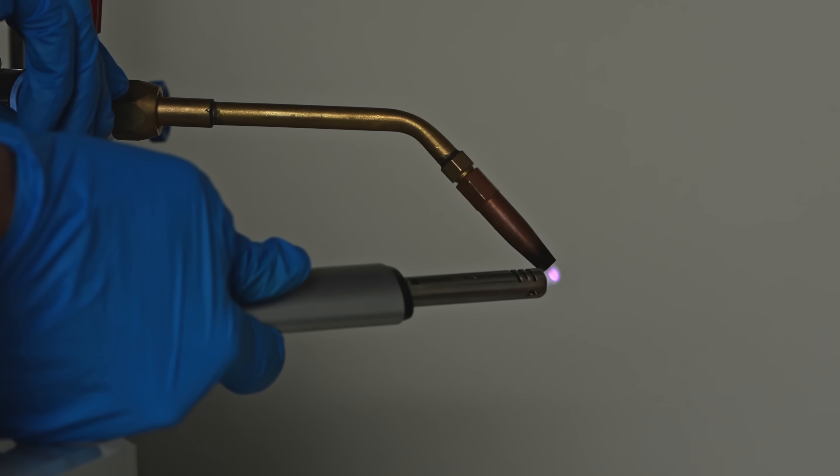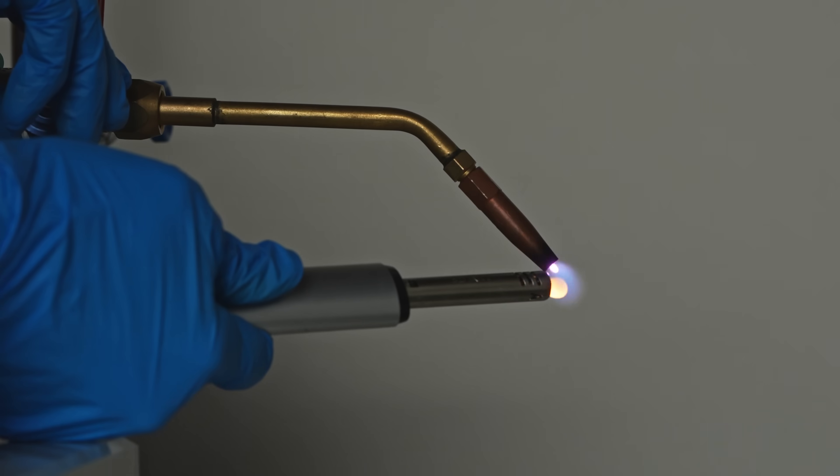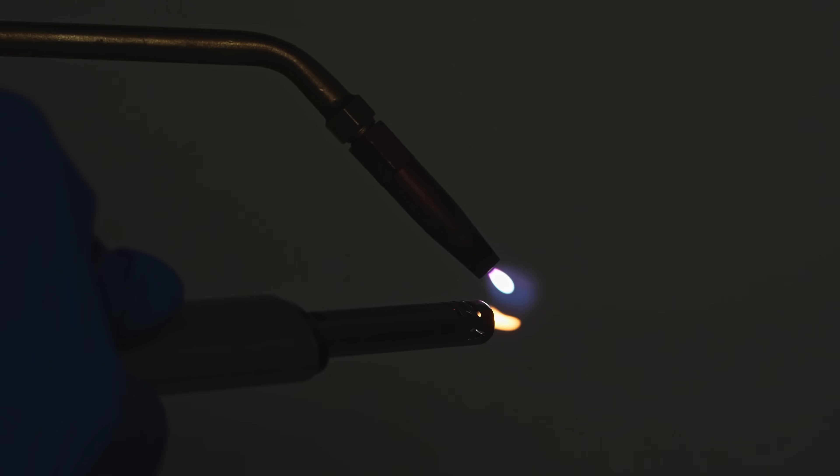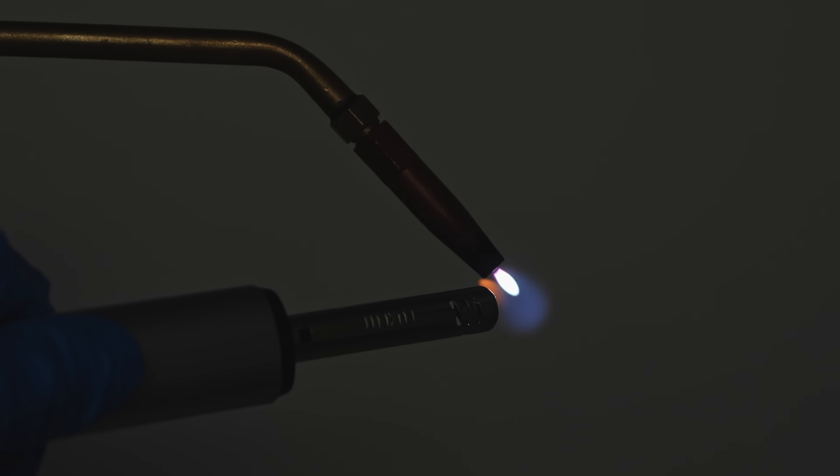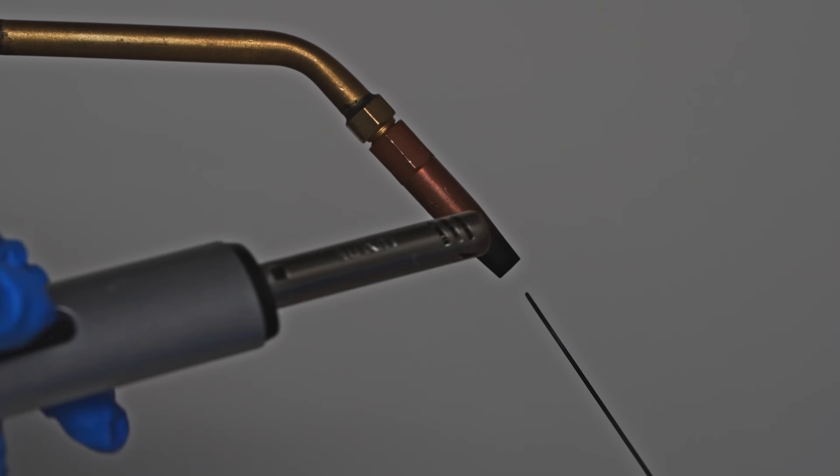Well, it looks like it's time to supply ozonated oxygen to the system. Somehow, I still managed to obtain short-term stable combustion with a mixture of cyanogen and ozonated oxygen. Then, I brought the tungsten electrode to the tip of the flame to try to melt it, as the temperature of the flame should exceed the melting point of tungsten.